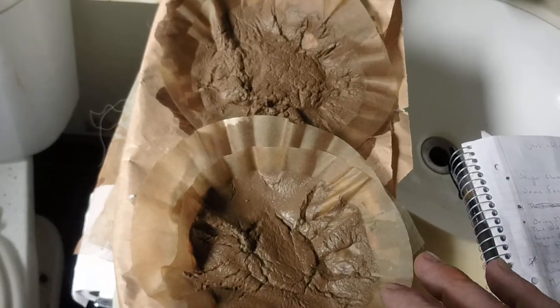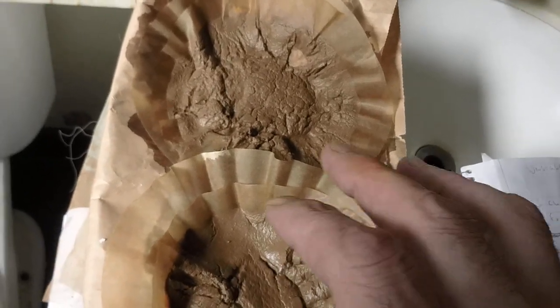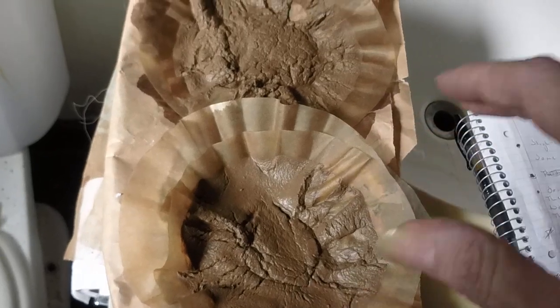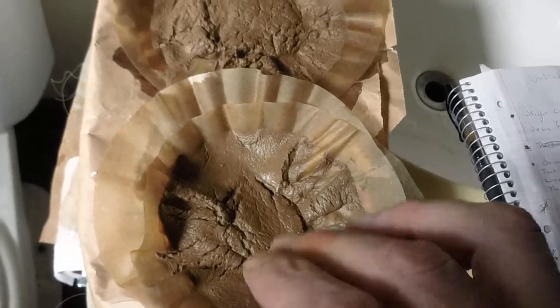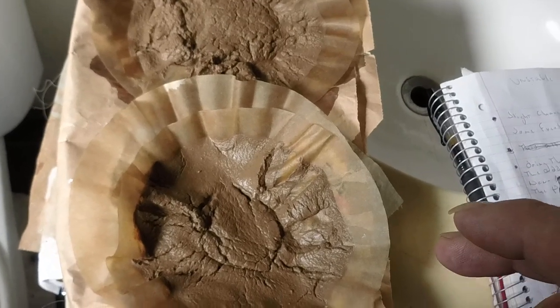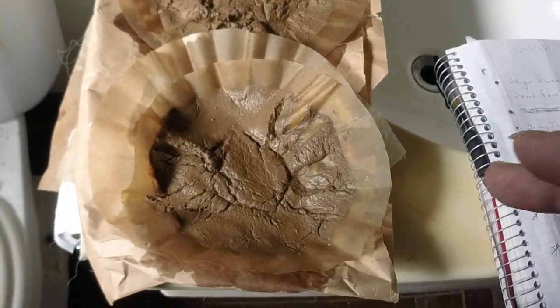What I'd like to do is set half of this aside for my use so I can do the wash, settle, and decant routine a couple of times and get it nice and pretty and white — always at the cost of some product. Every time you wash your freebase, you're going to lose some product. So keep that in mind.